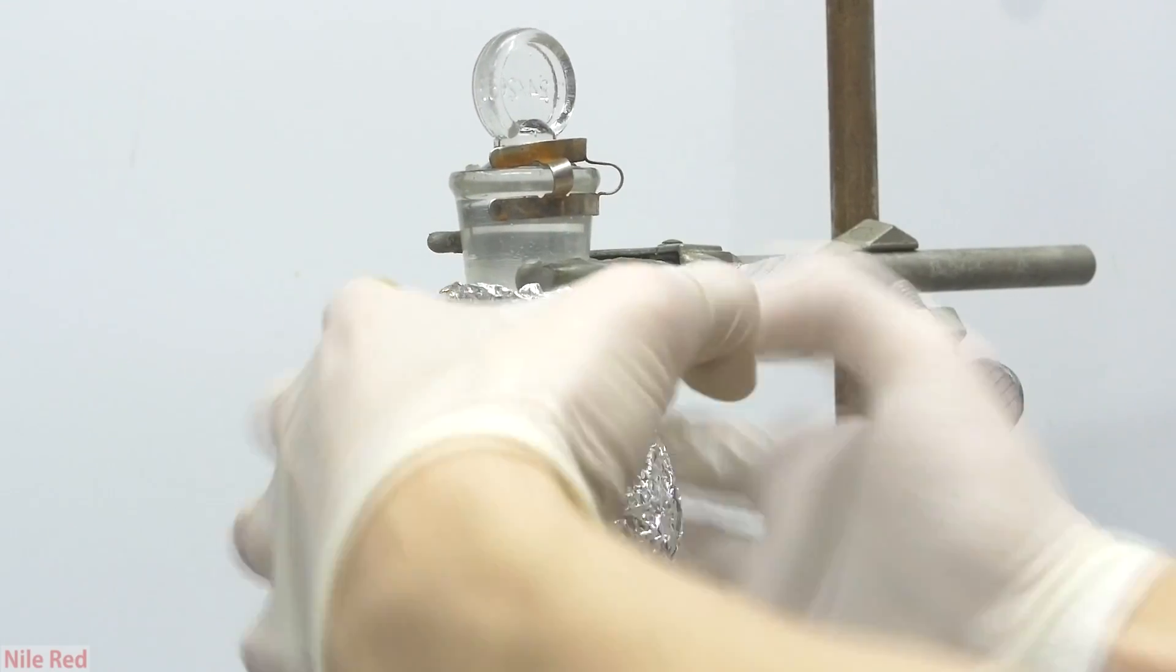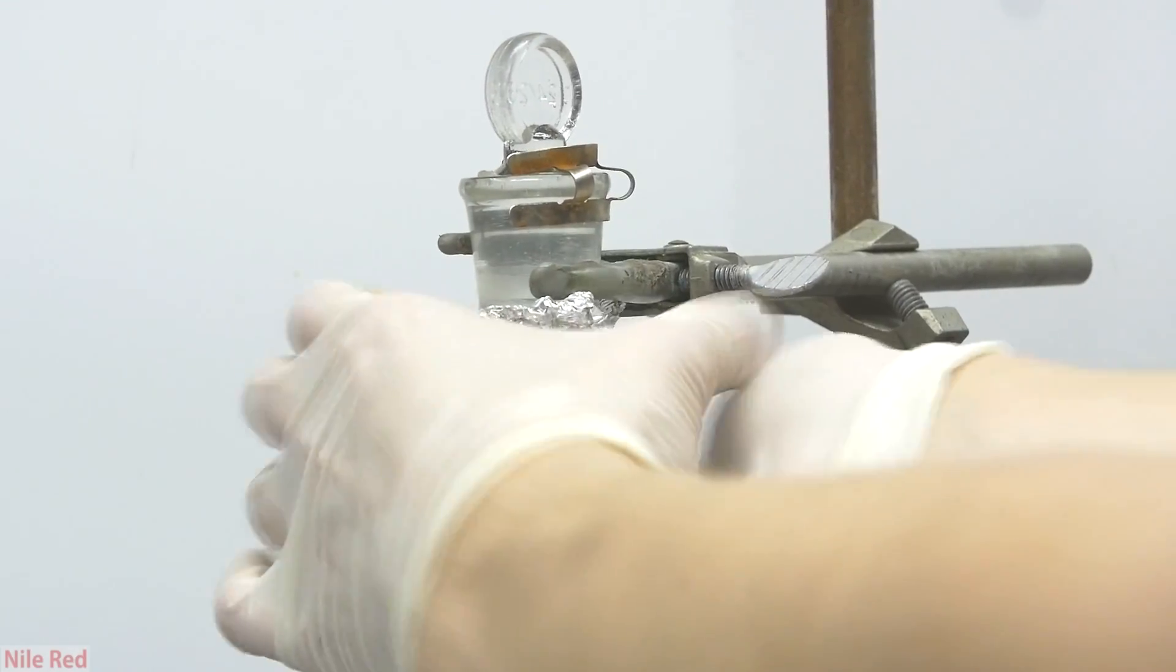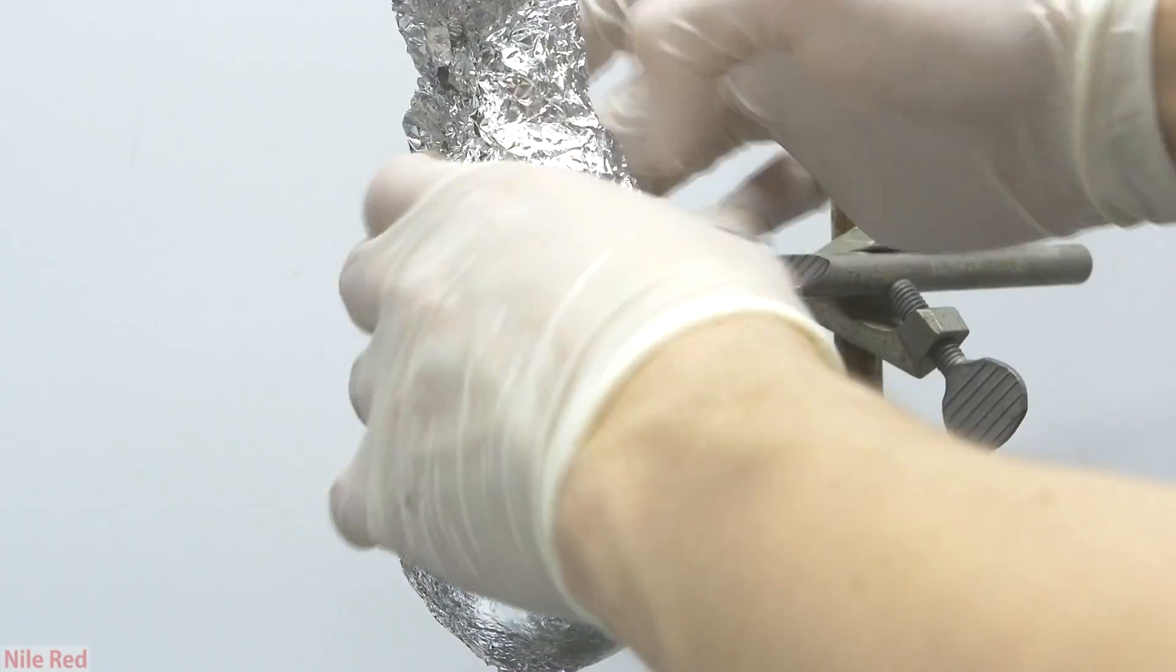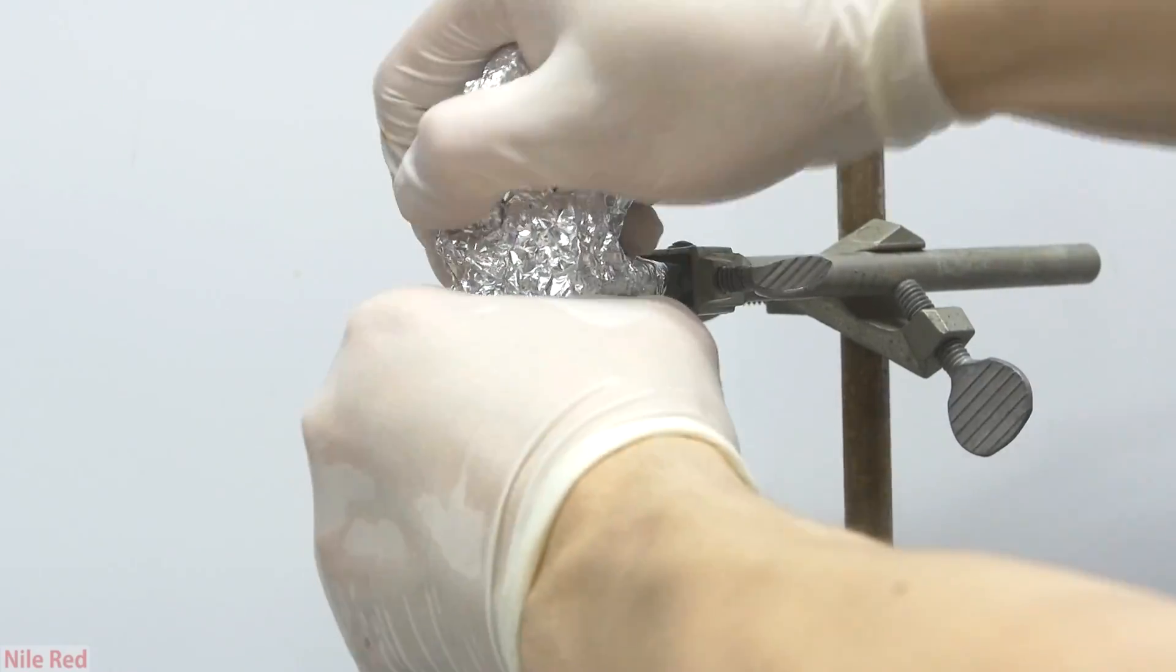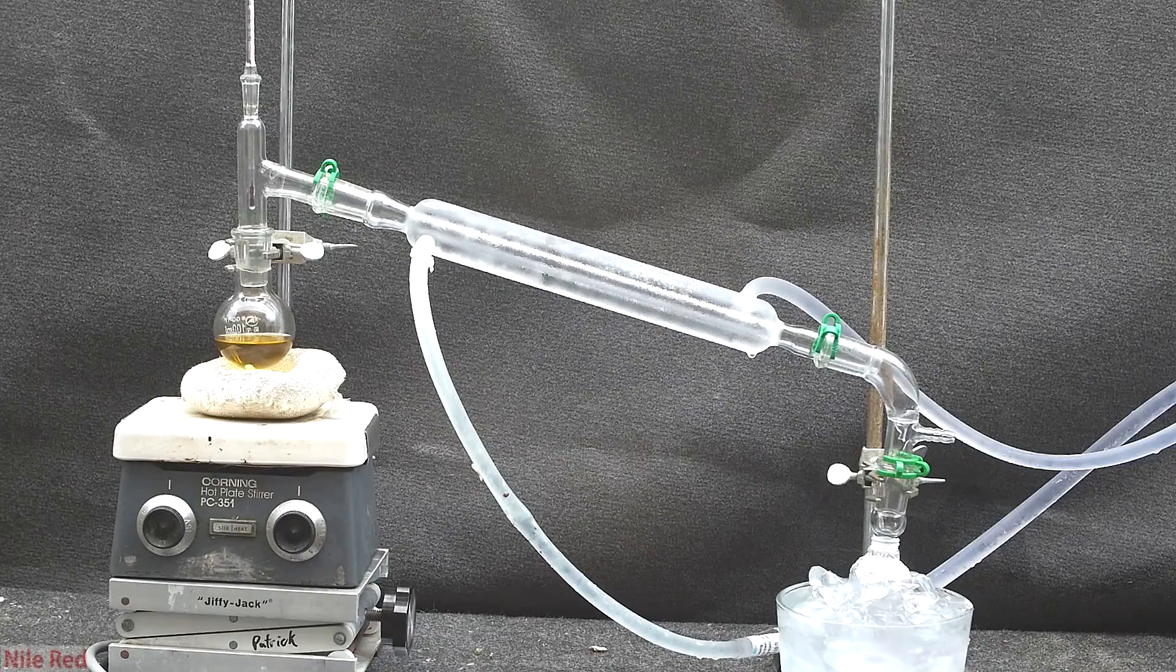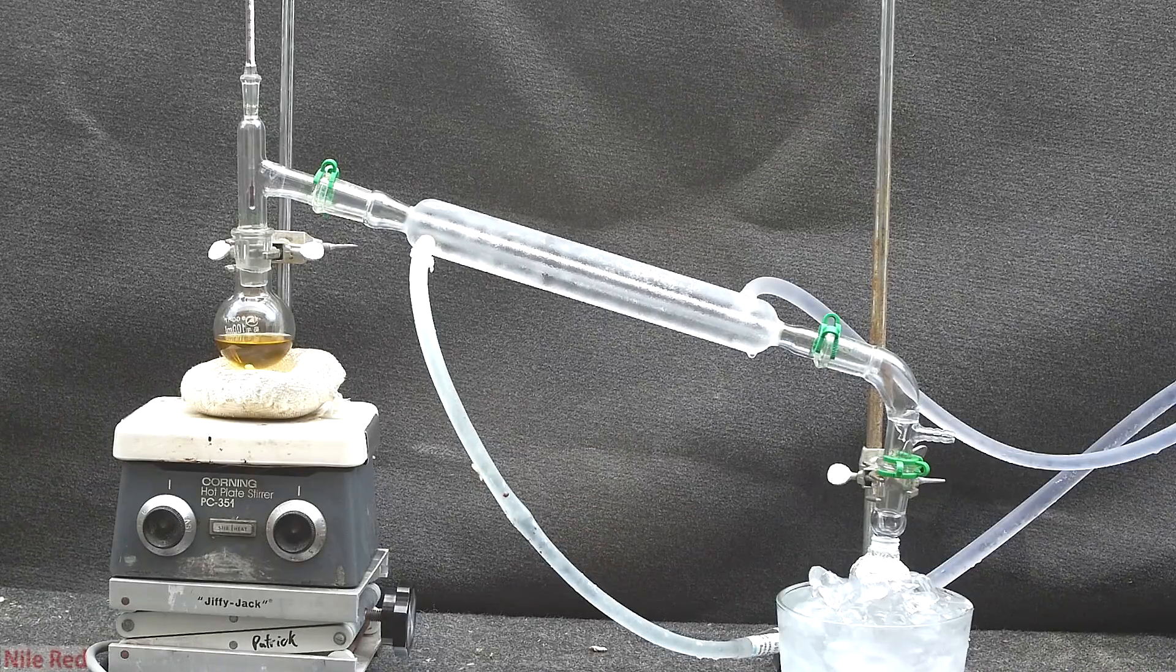I ran out of time and it was getting late, so instead of doing the second distillation right away, I opted to cover it with aluminum foil and do it the next day. The next morning, I set up my distillation apparatus, and you can see what it looks like here.